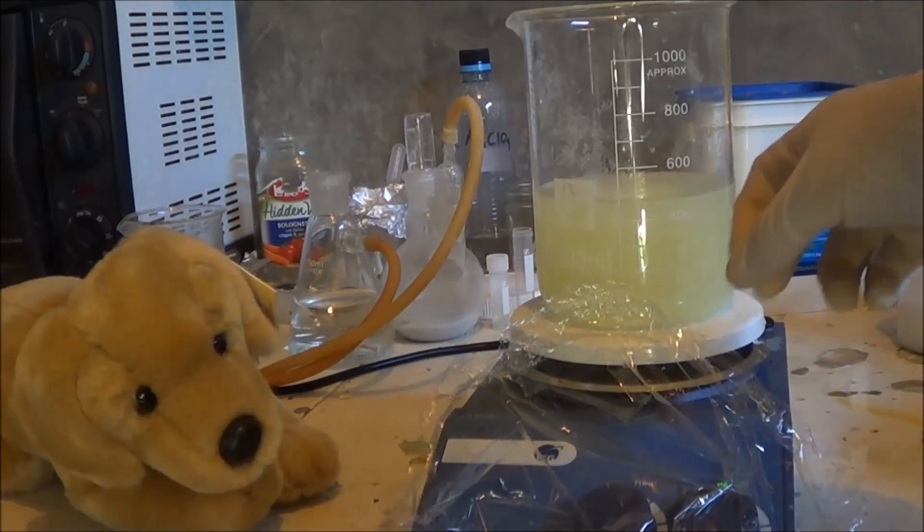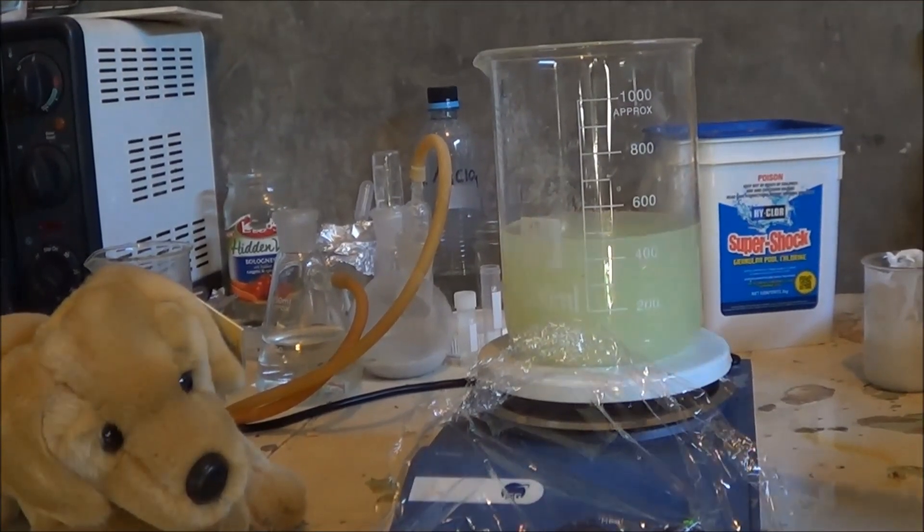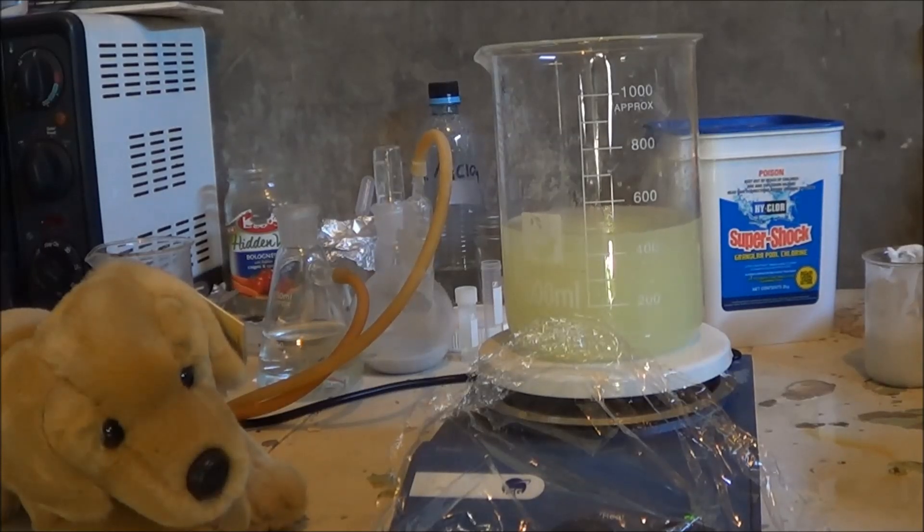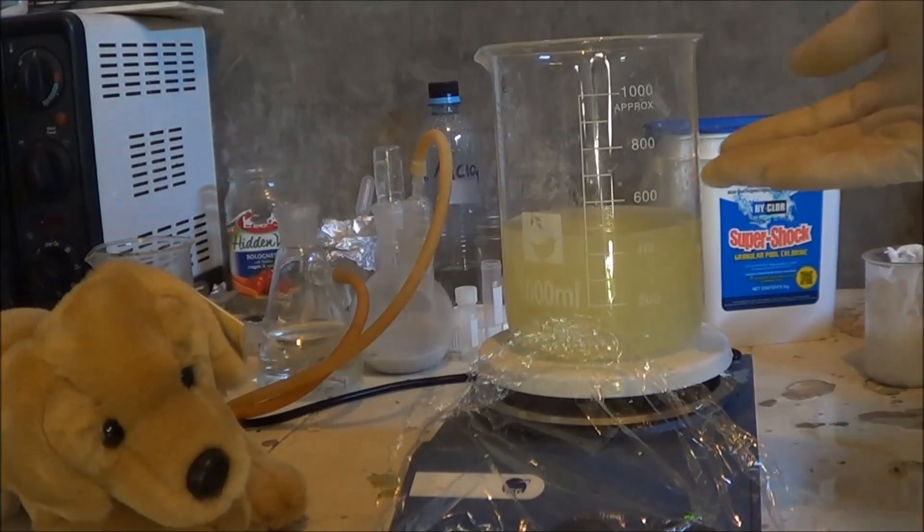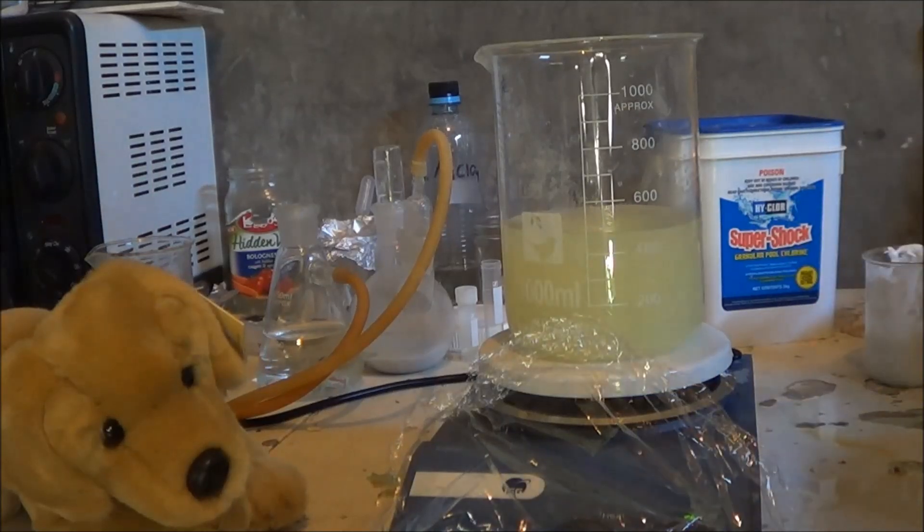Hydrazine is quite toxic and unstable to contact with air. So, what I'm going to do is I'm going to quickly put some glad wrap over the top, and that should limit the amount of air contact it has and contact I have with hydrazine. It's going to foam a lot. Is my beaker going to contain all the foam? I'm not really sure. Usually, I do it with a lot less liquid in here. But, I just wanted a lot of hydrazine now. So, we could well overflow the beaker, but hopefully we don't. Hopefully, I can use my new stirrer to keep the foam down a little bit.